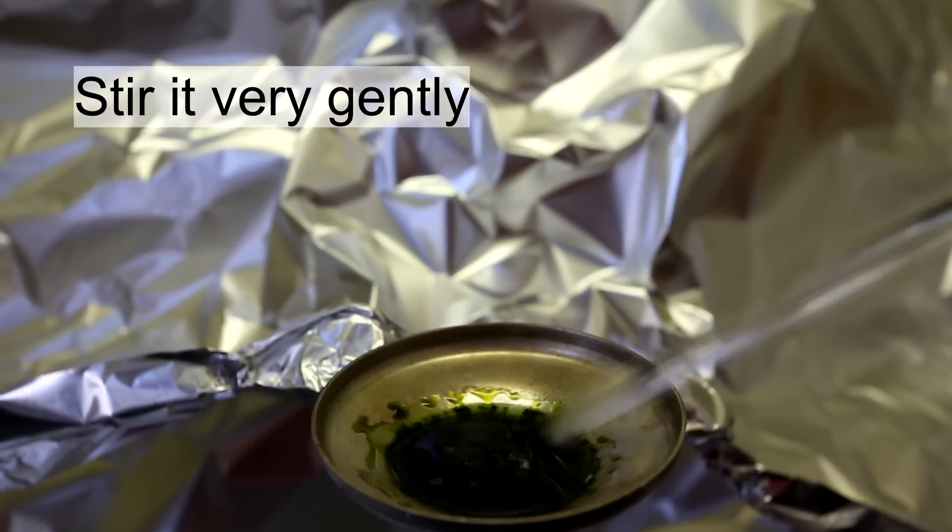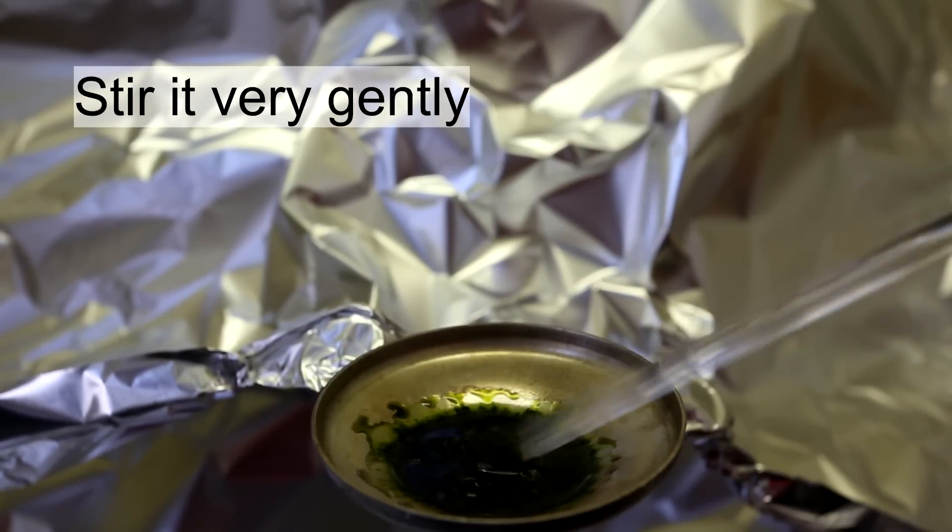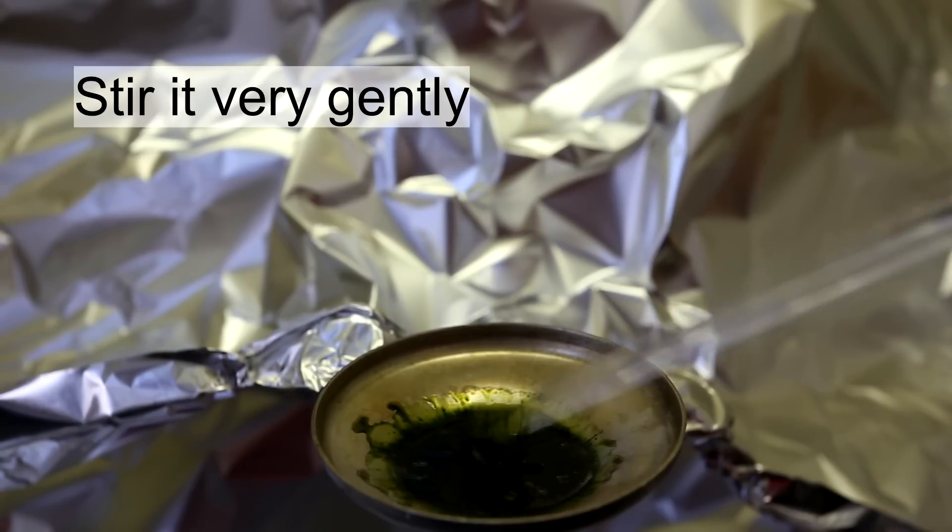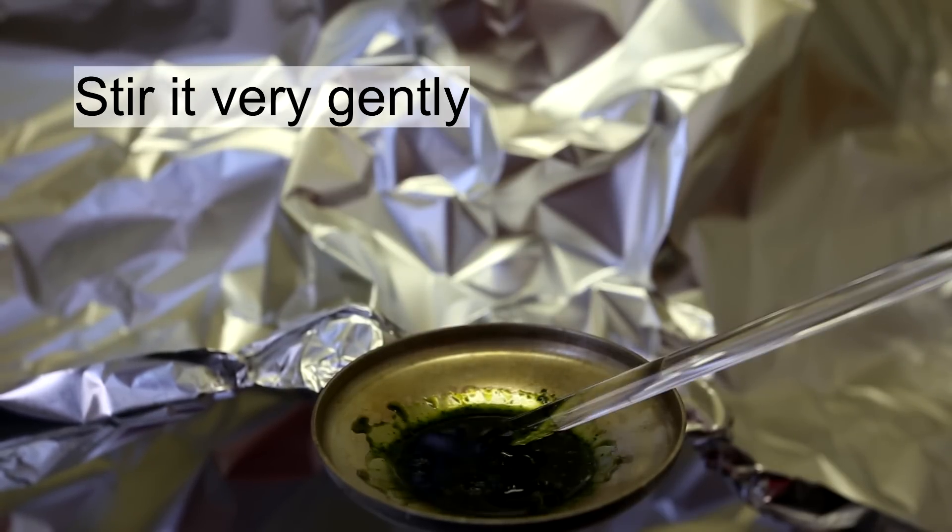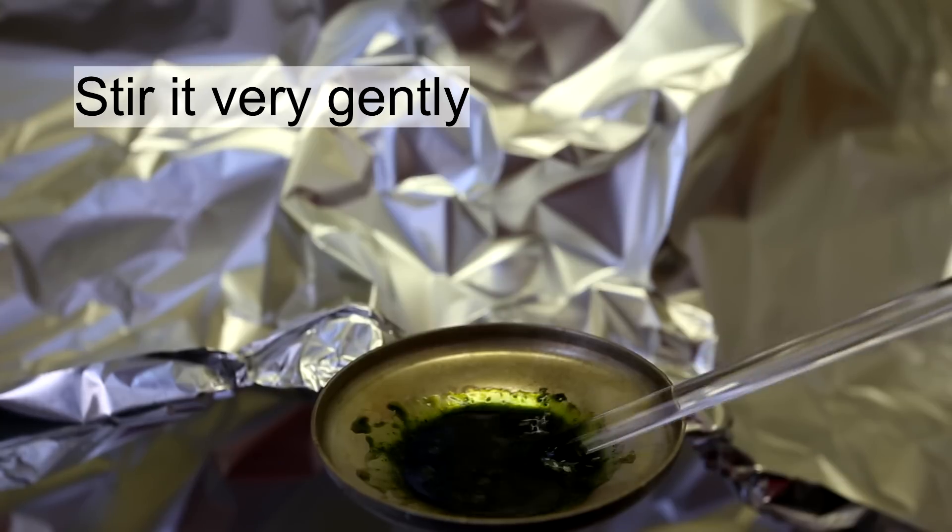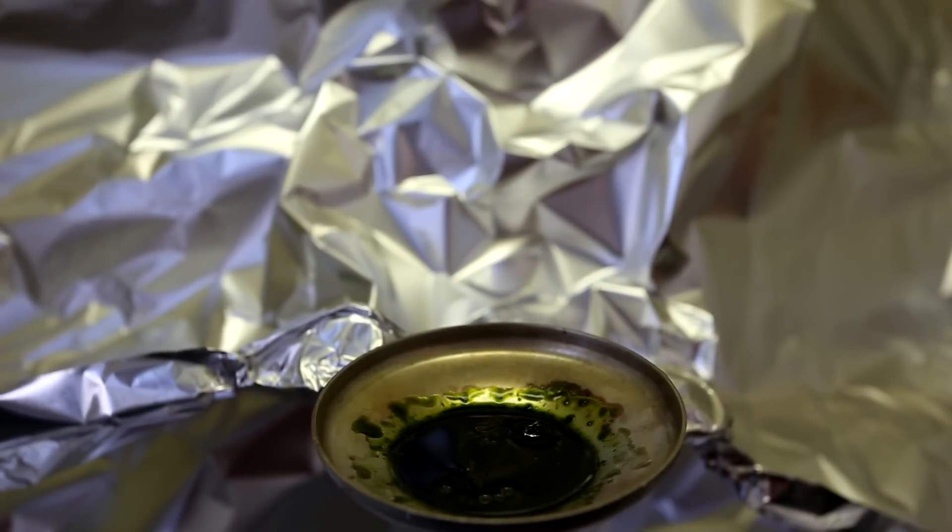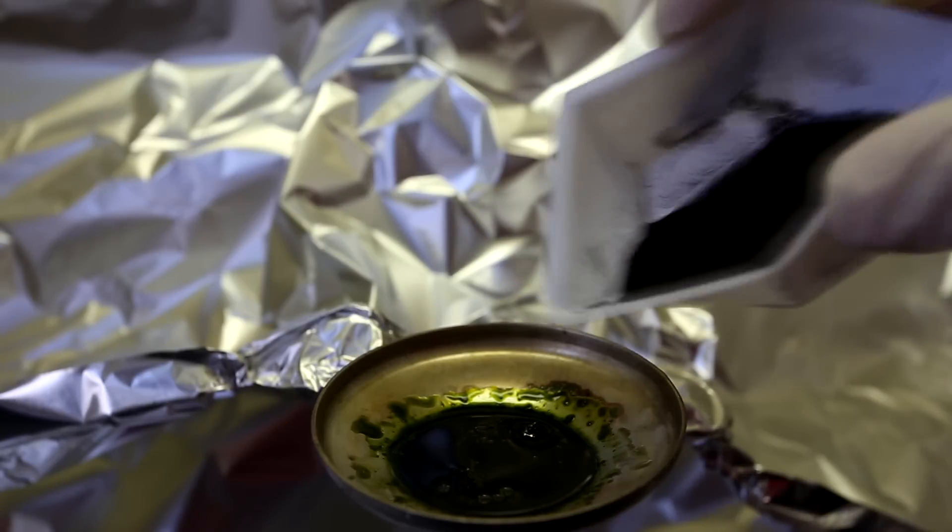You should add cold sulfuric acid to limit the temperature increase of the addition. The manganese heptoxide can become explosively unstable at temperatures higher than 55 degrees Celsius. You can add more potassium permanganate to achieve the desired consistency and to increase the concentration of the manganese heptoxide.